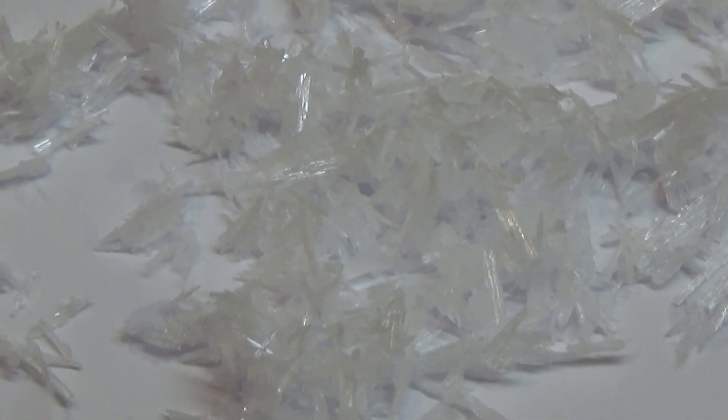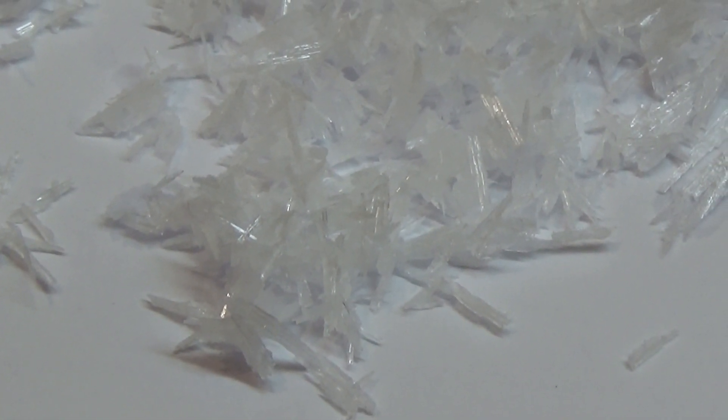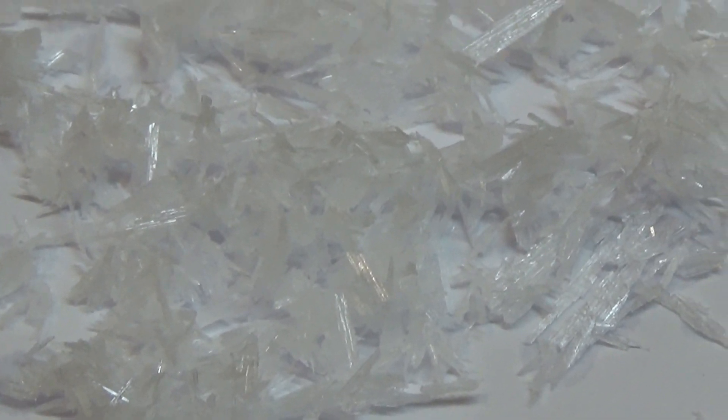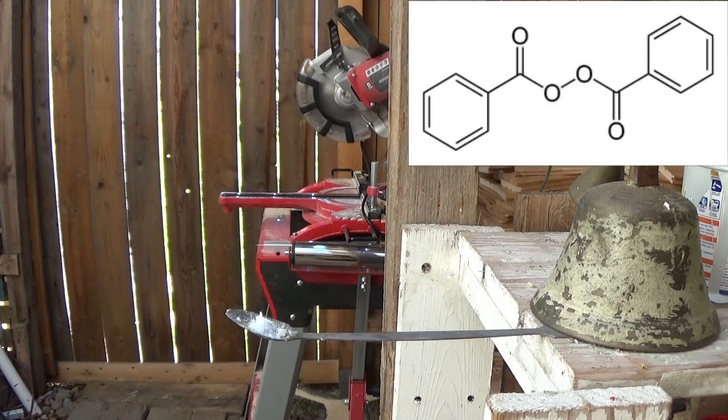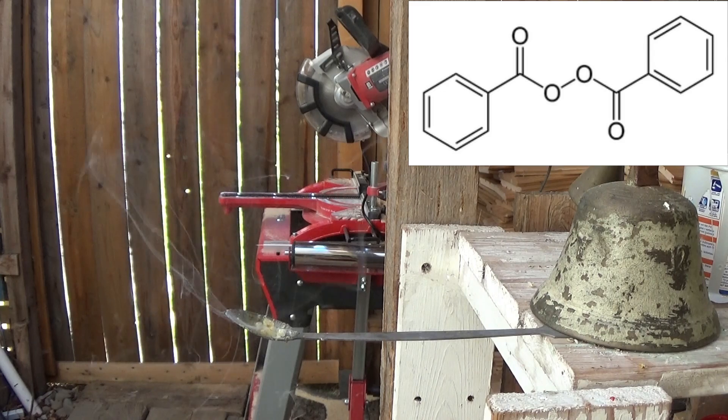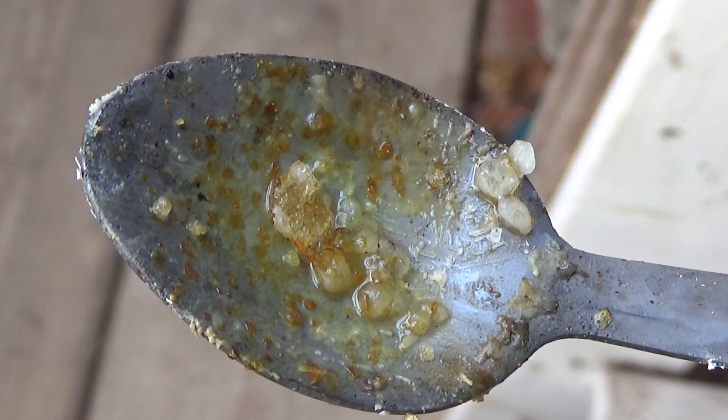But now we still have to confirm that it really is dibenzoyl peroxide. For this we just set some of it on fire. And woosh, there it goes. Just behaves like an organic peroxide should.